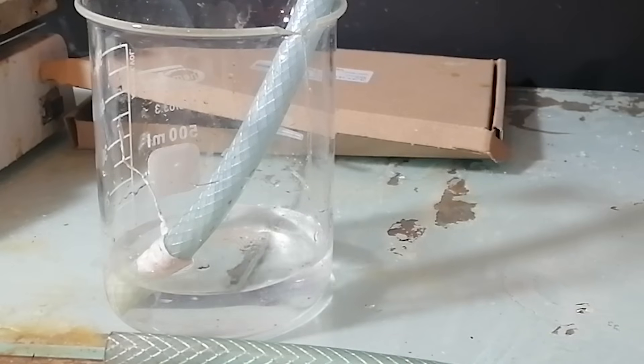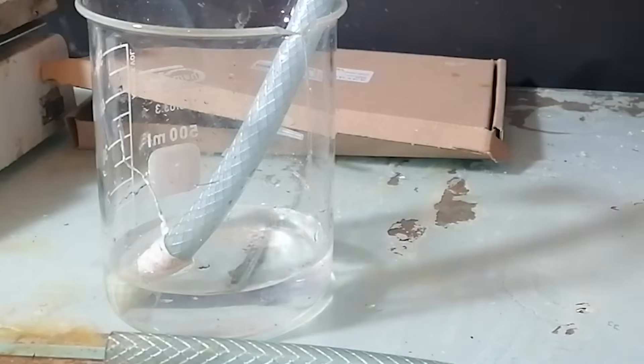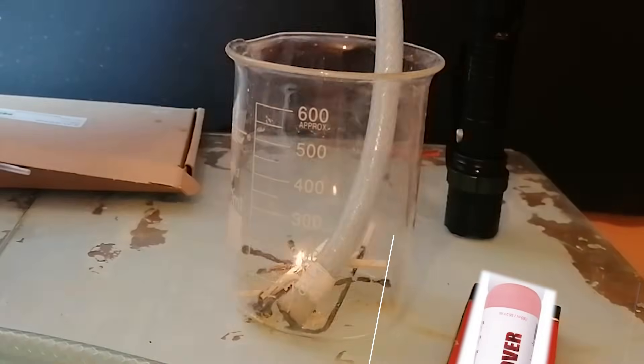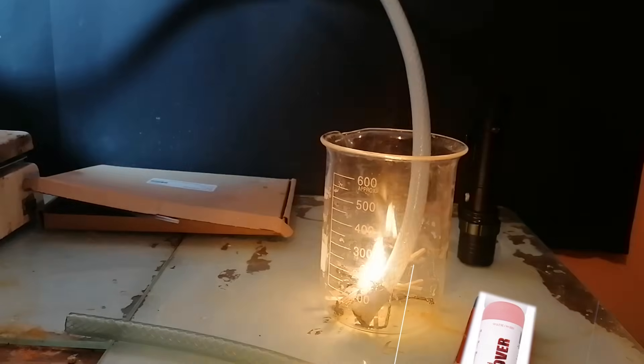To prove that the gas is being generated, I've put it in some water. The bubbles indicate gas generation. I've also discovered that you can shake the thing to increase nitrous production and it just looks really funny to say the least.